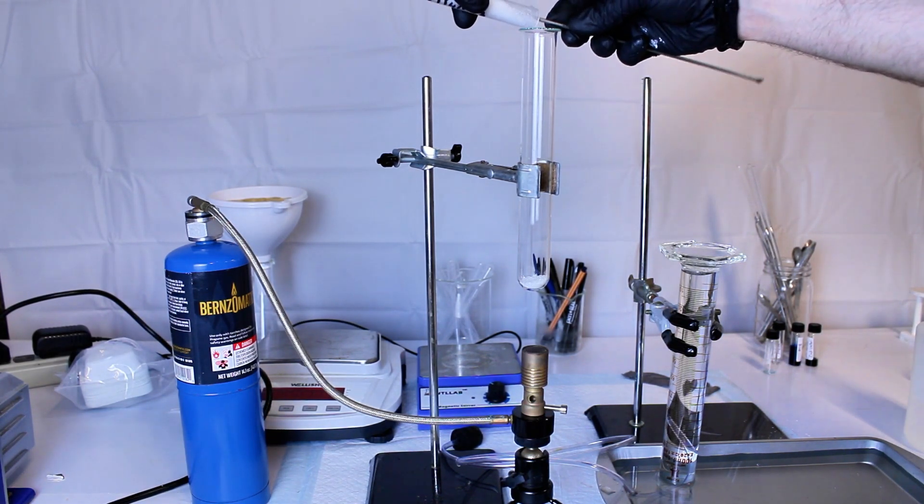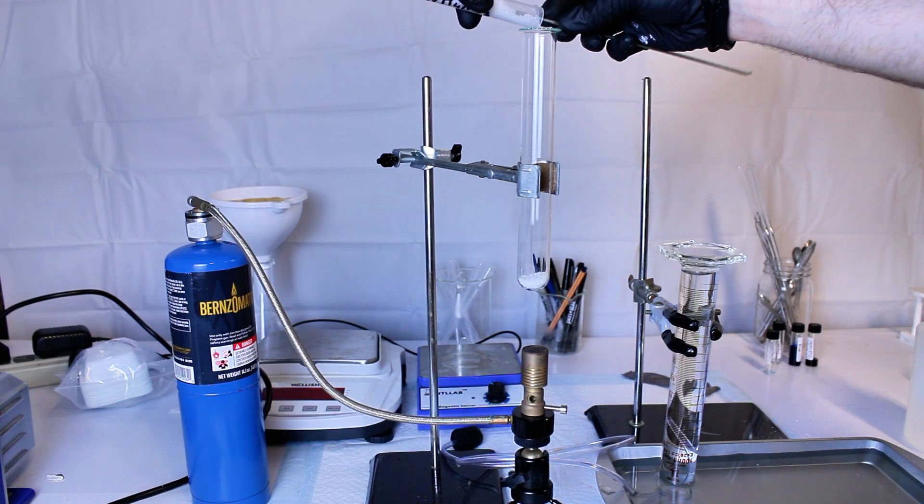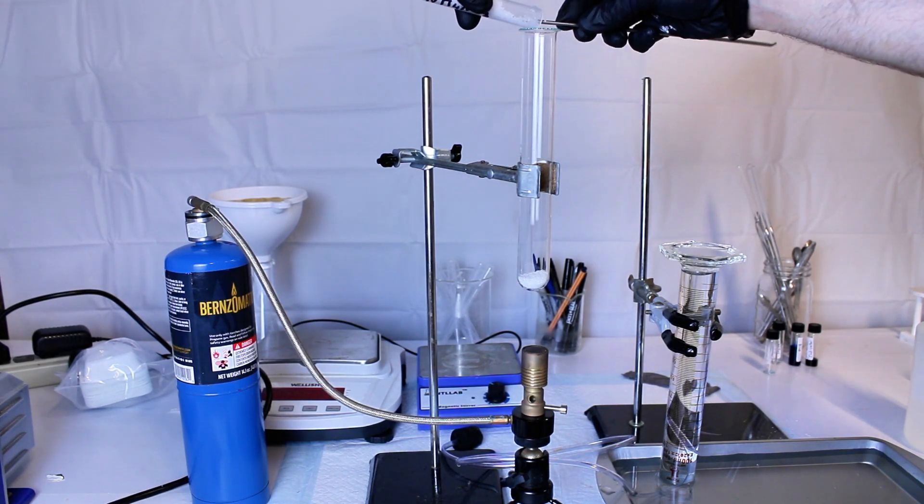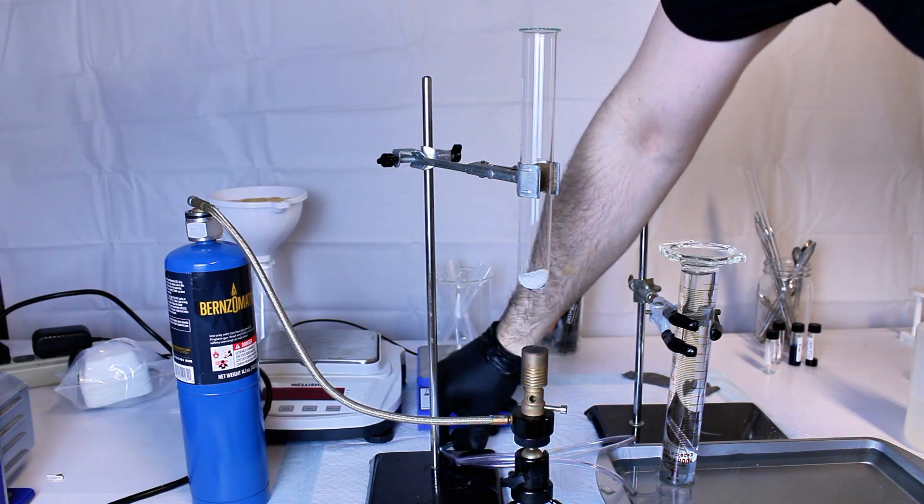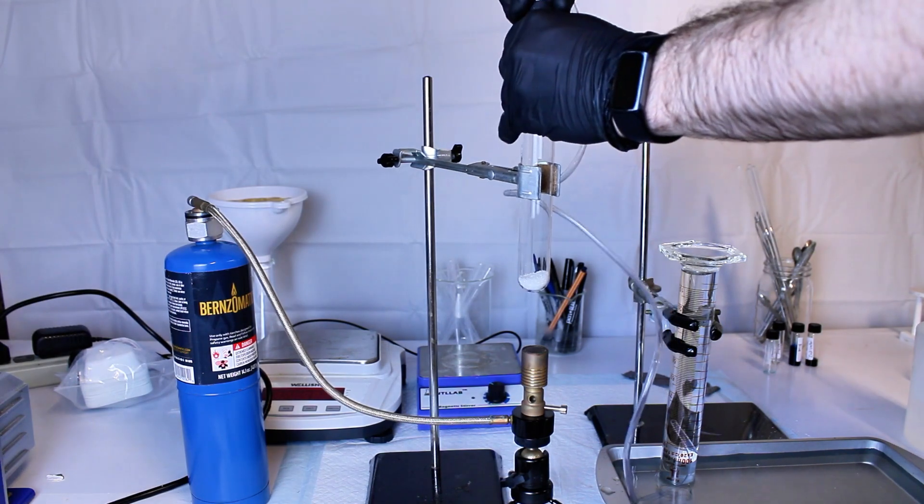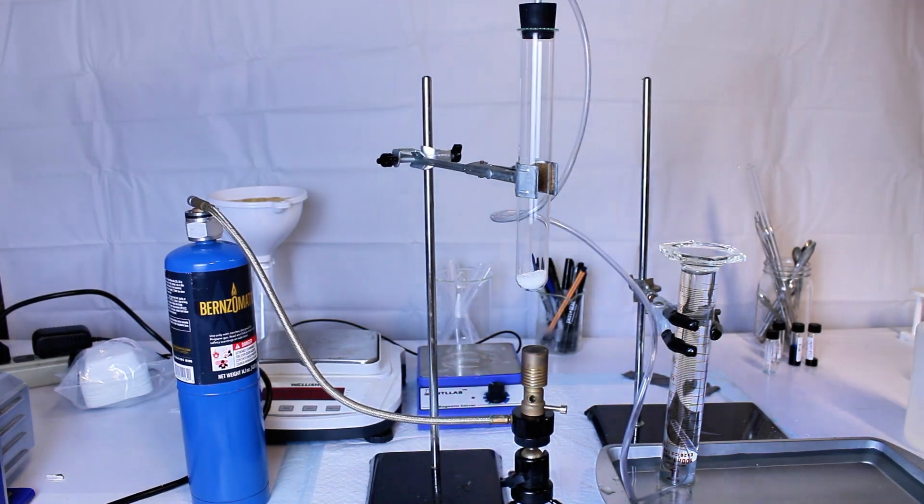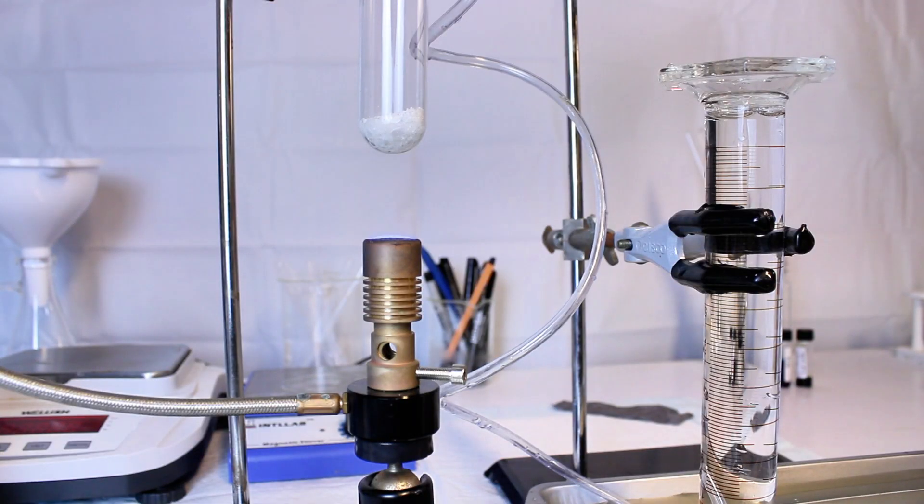In any case, to make nitrous oxide, the first thing I do is add about 2.5 grams of my ammonium nitrate to a large test tube. The test tube is then plugged with a rubber stopper that I fed a line through and into a graduated cylinder that's filled with water and suspended above a tray of water.